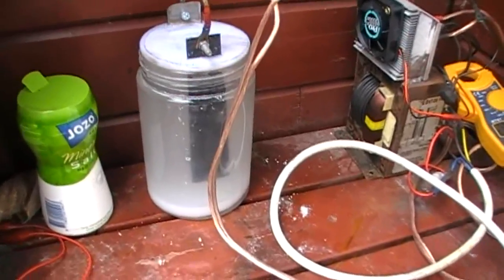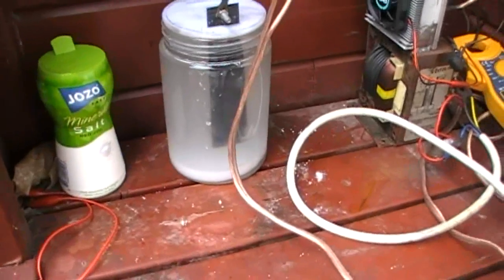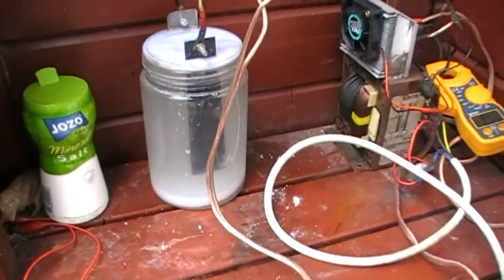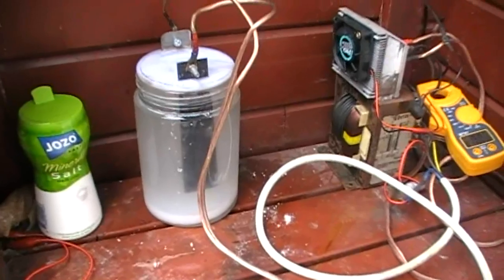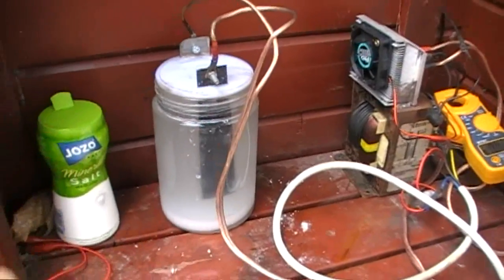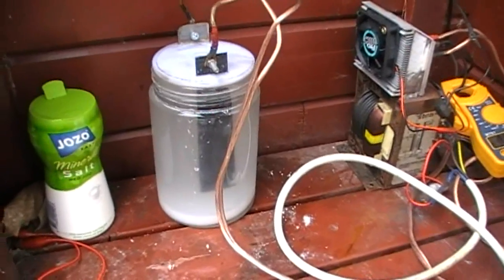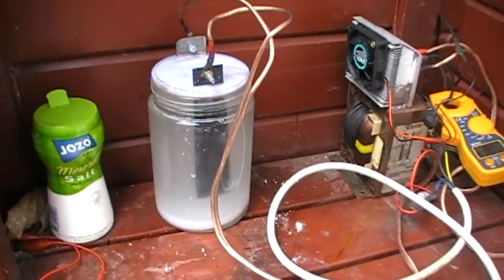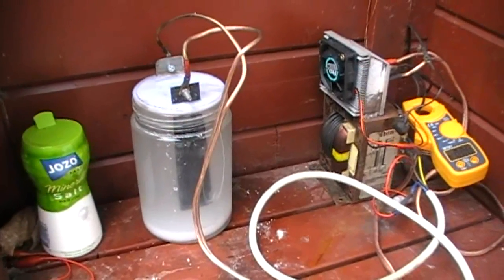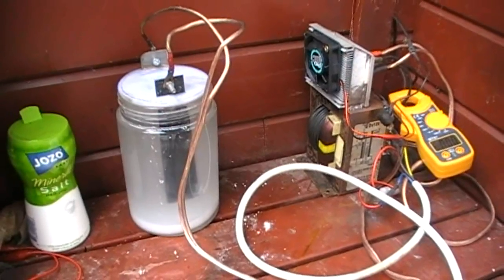Okay, I've emptied this whole bottle of salt which is about 500 grams. So it's just to plug it on and wait some days and be careful because when I turn on the cell it will produce chlorine gas but it will stop as the pH levels out. I'll get back to this cell after some days and I'll then do some calculations for how long it will take.